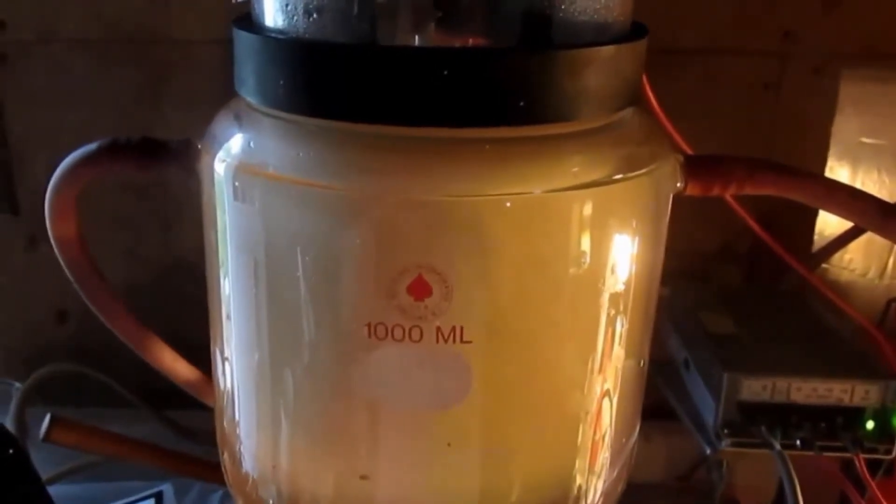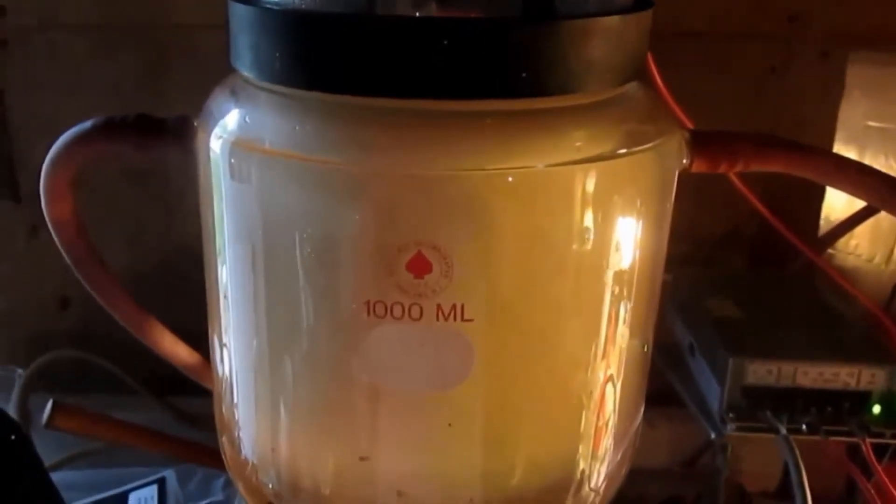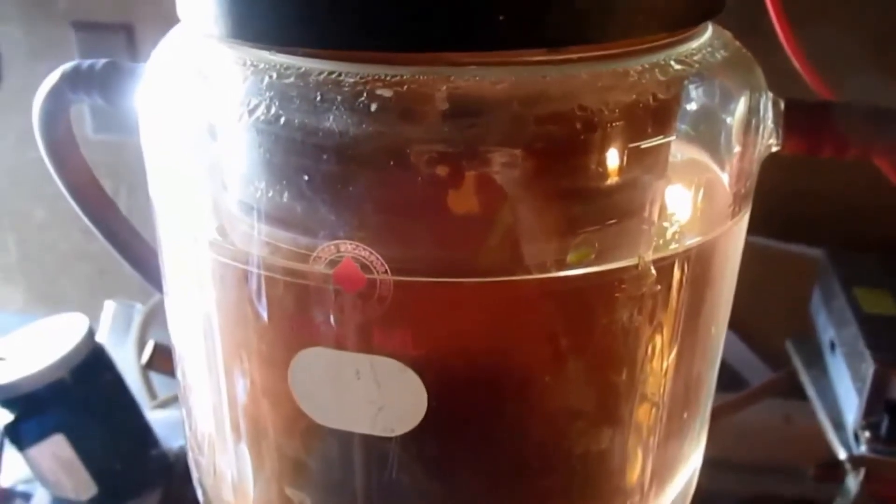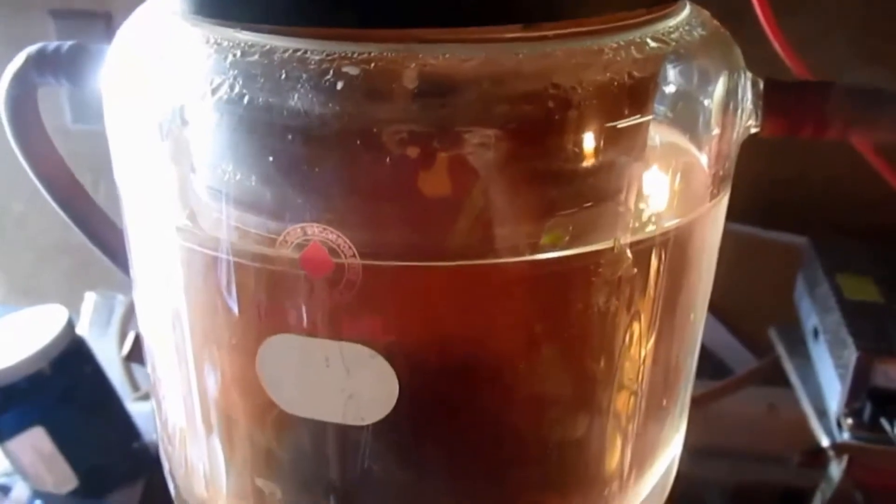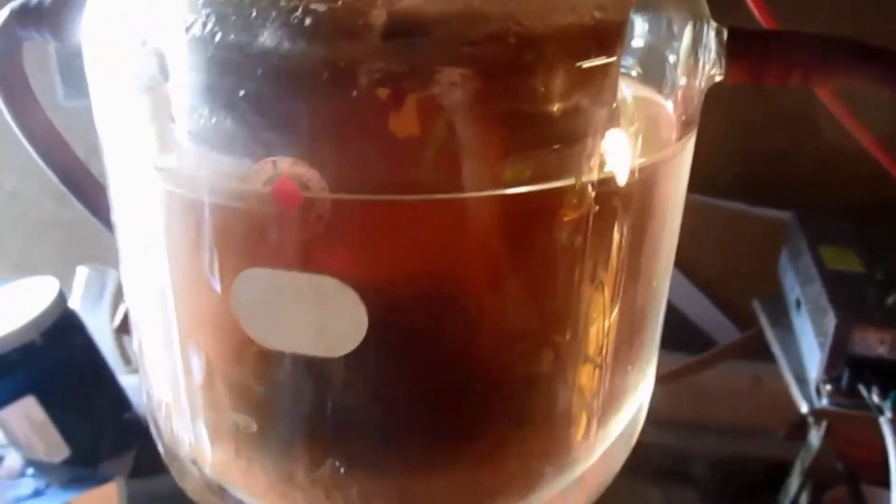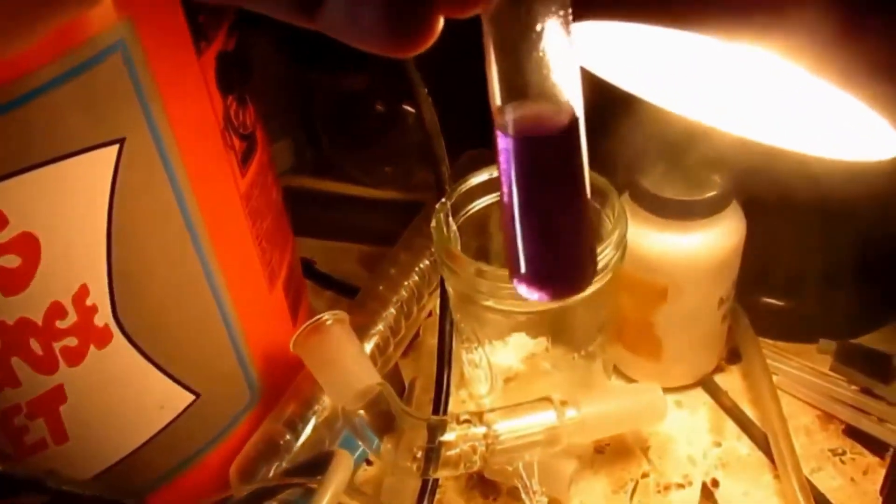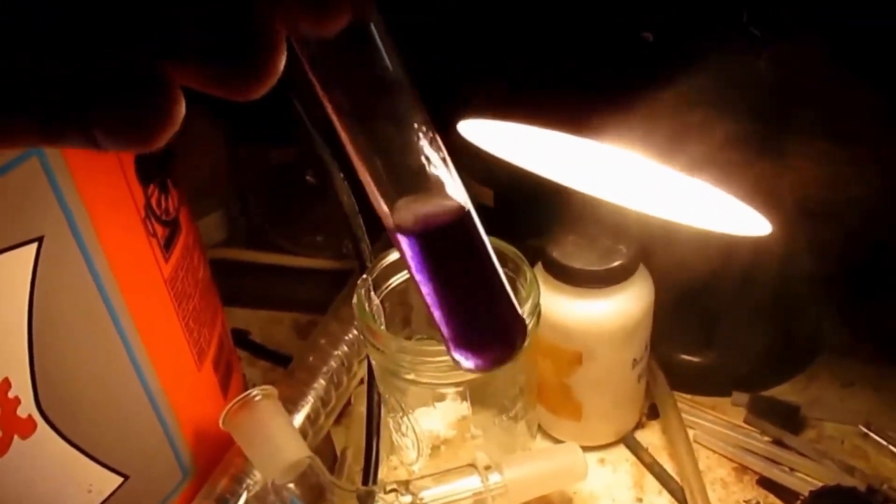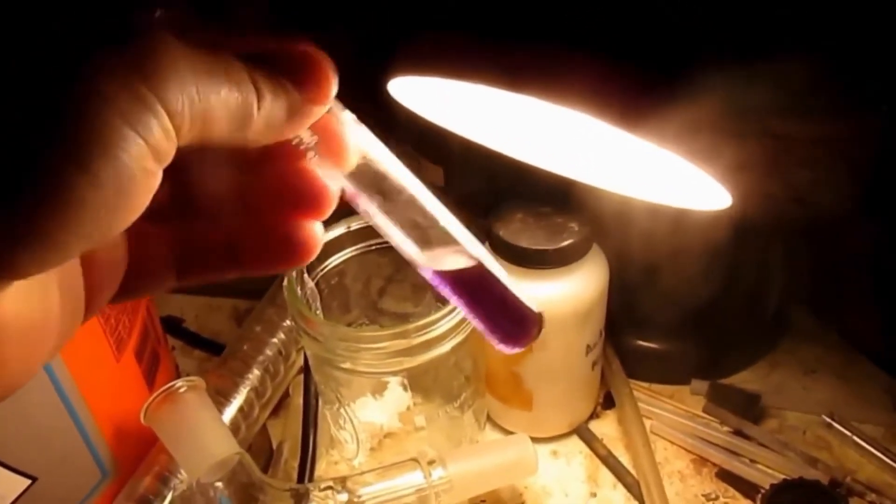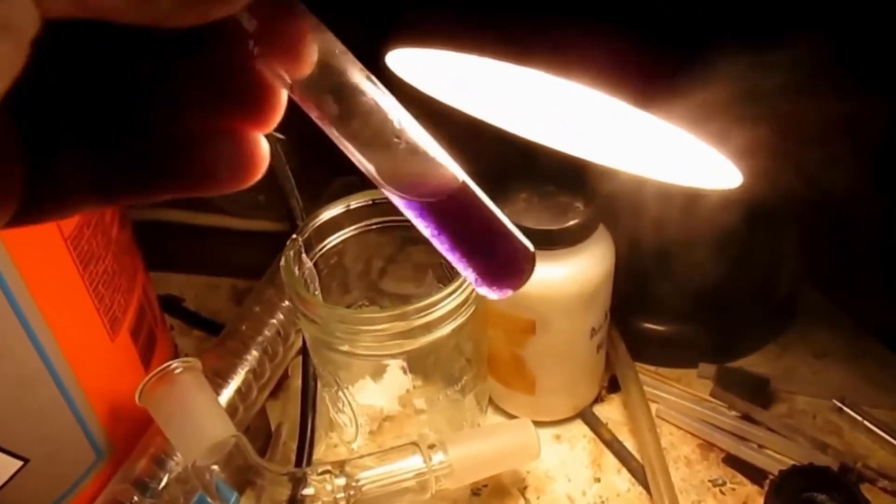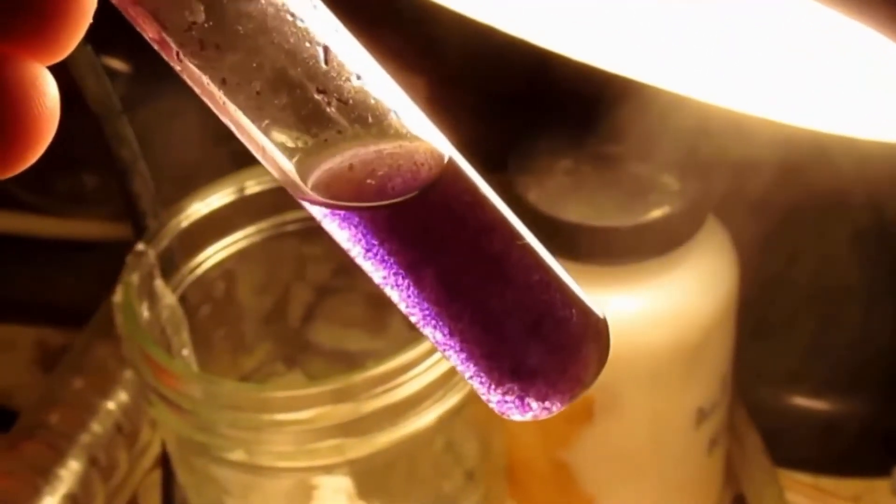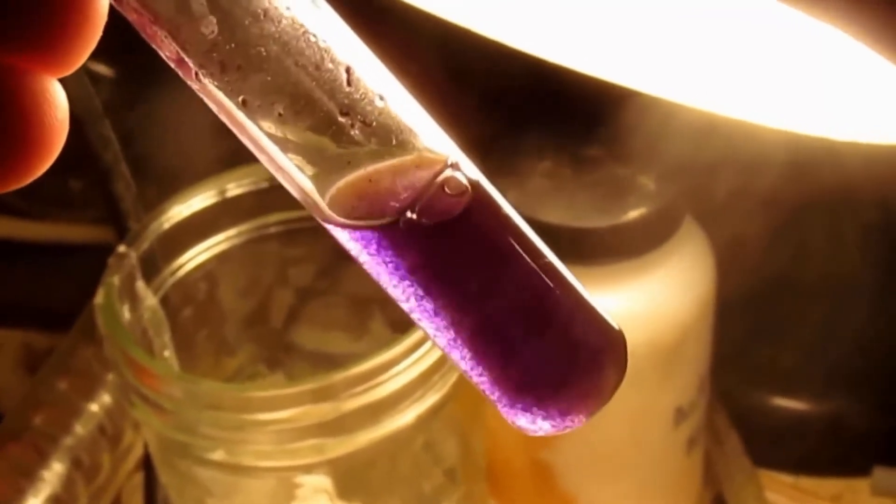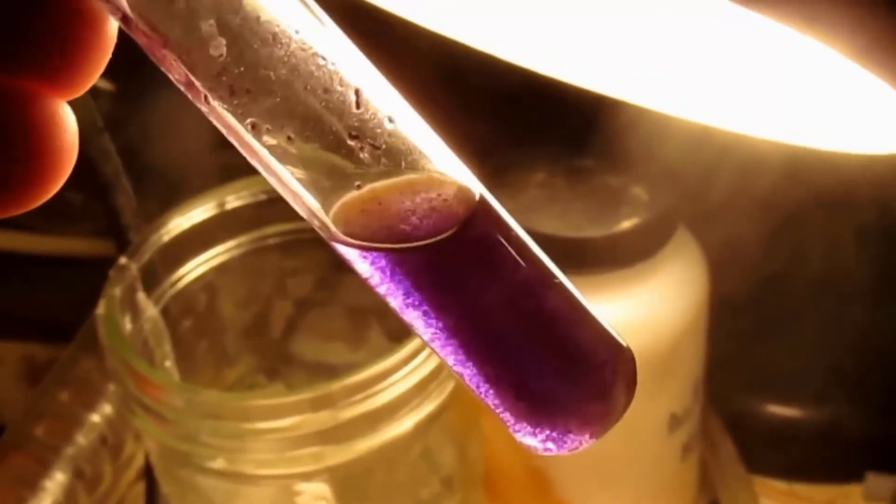Here we are, approaching approximately 72 hours later. I reacted a sample of the electrolyte with a 1% methylene blue solution. The precipitate and the violet color strongly indicates that perchlorate is present in the cell.